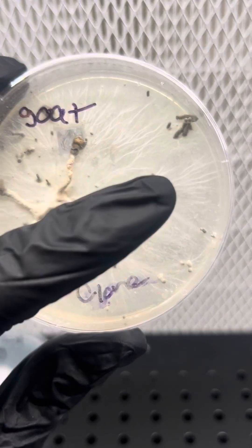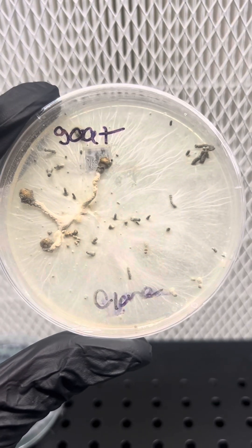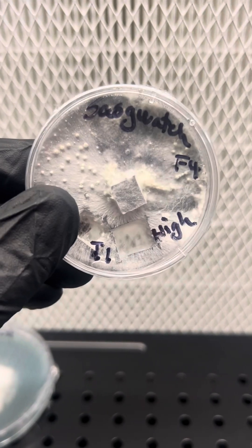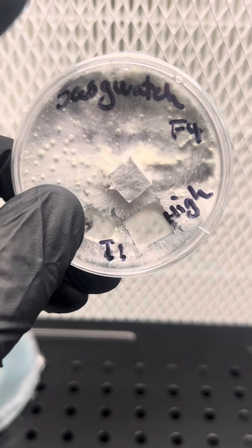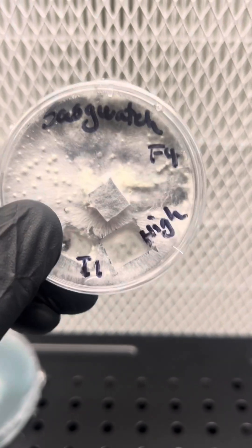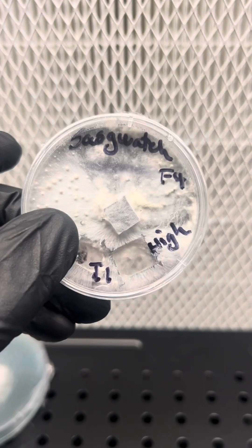You have mushrooms that grow right here — you get big mushrooms, you get pins, you get some aborts. A lot of times when we grow out some cultures, we don't get the desired flushes that we want. Here's another example: you can tell we have some rhizomorphic growth on this side, some tomentose growth over here, but this part of the plate is already fruiting. If I were to transfer this plate, I would transfer from right here to grow that out and start isolating.